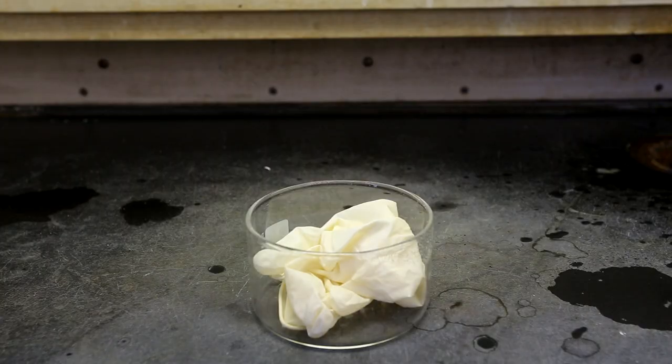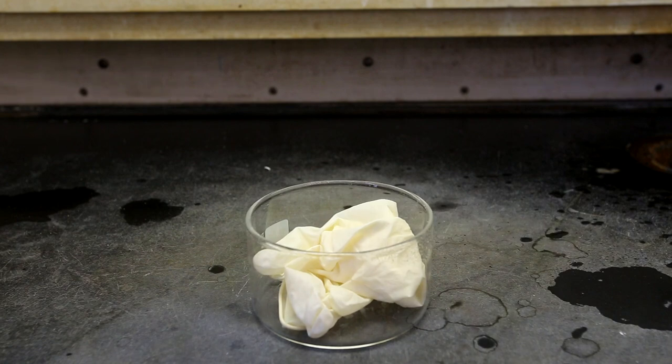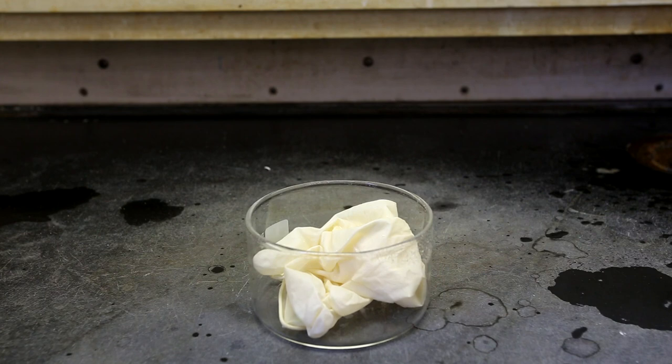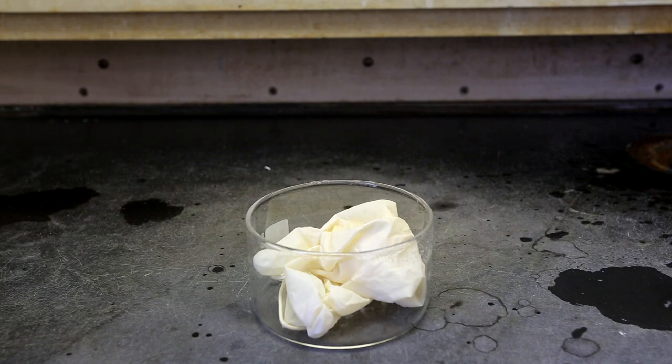This is just a comparison to show you what regular lab-grade concentrated nitric acid does to a latex glove. Nothing appears to happen and there is no vigorous reaction or fire, however the nitric acid is capable of penetrating through the latex glove. Even though nothing visible is happening, if you were to get nitric acid on your hands and you were wearing a latex glove, it is quite possible that you would still suffer from nitric acid burns. Latex gloves offer little to no protection against nitric acid.